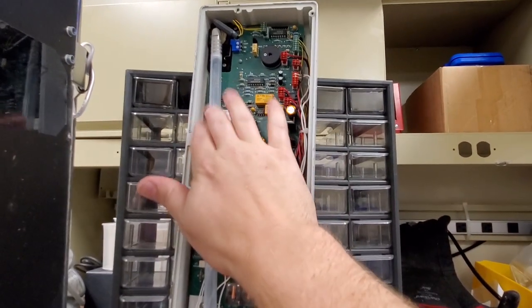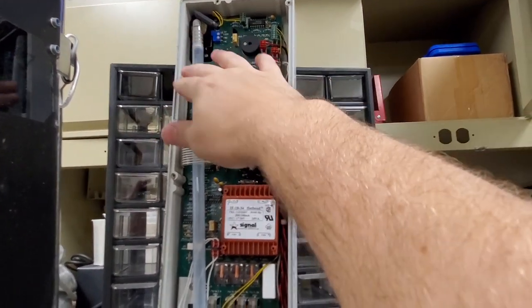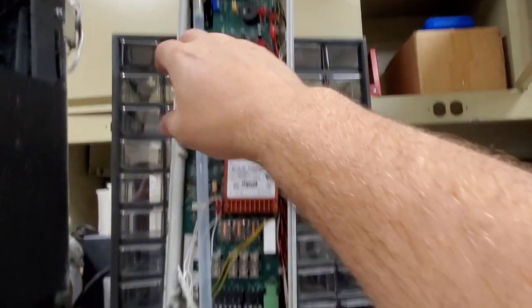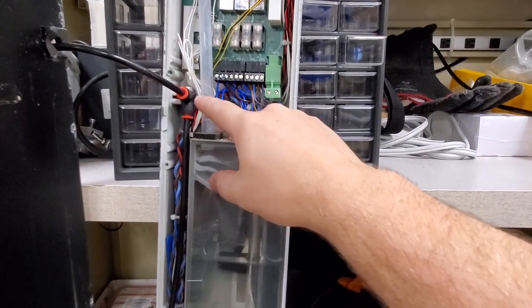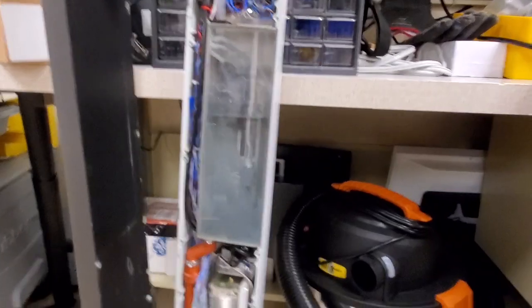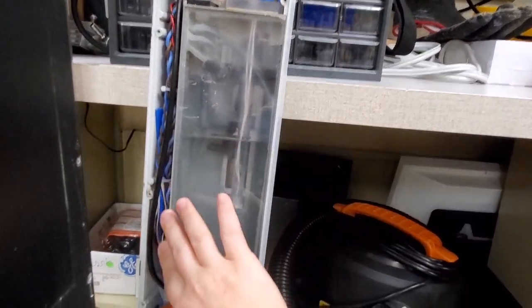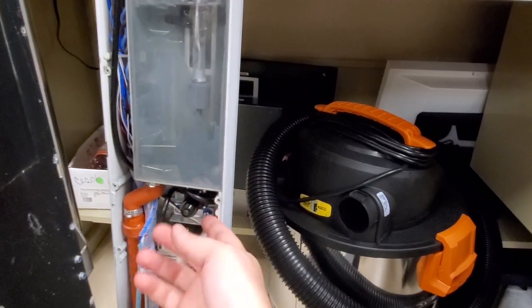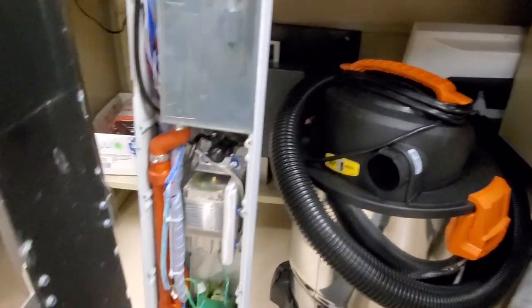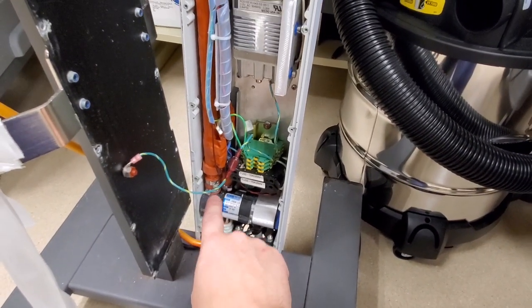This acrylic line right here, I've had it crack and if it cracks you can trim off the hose, raise it up, install a little junction down here that goes into your tank and press on. You'll have tank leaks on some of these if they've had impact damage. This reservoir right here is really good. But if you take a look down here, there's some evidence of something else going on.